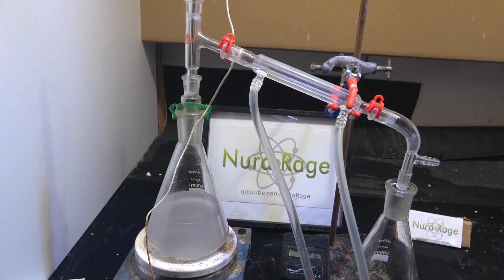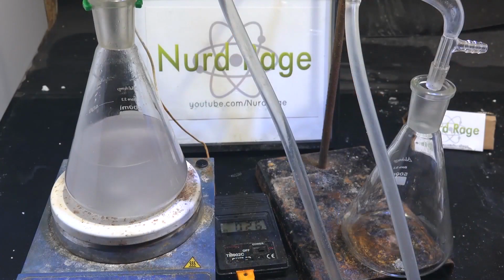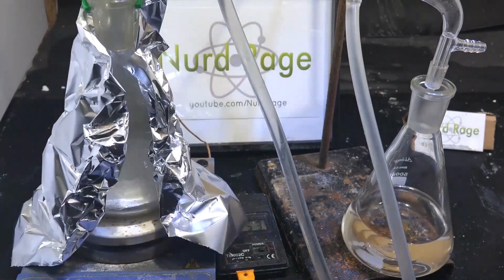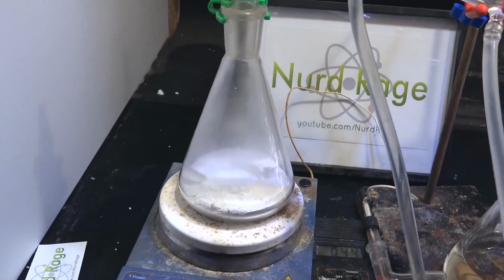Now reassemble your reflux apparatus into a distillation apparatus and distill off the methanol. We want relatively solvent-free sodium methoxide for the next step. Now turn off the heating, stopper the flask, and let it cool. While it's cooling, we can prepare our reagents.